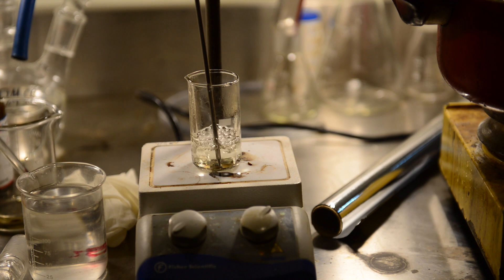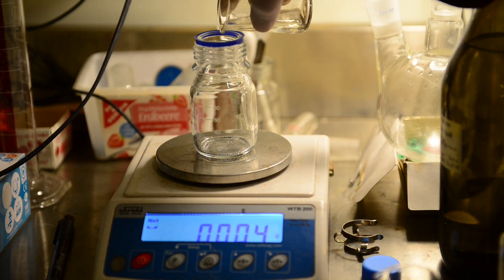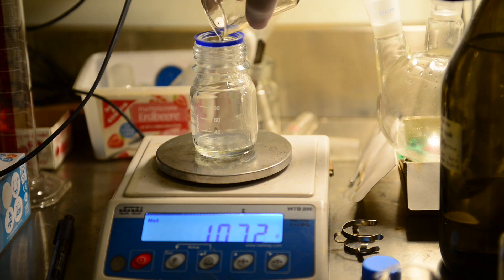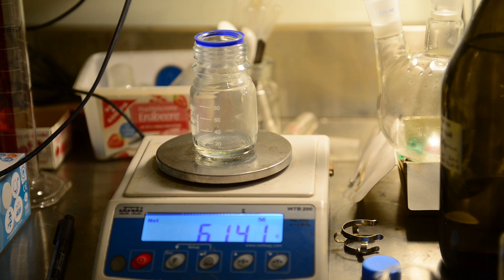After analysis of our experiment, the most obvious reasons for this failure were the following: sodium hydroxide must be powdered before addition. Unfortunately I have learned this somewhere on the internet when it was too late. Secondly, the addition rate must be much slower with smaller portions. The flask must be equipped with bigger, efficient condenser. The steam distillation must be conducted more efficiently by passing steam from the external steam generator setup.